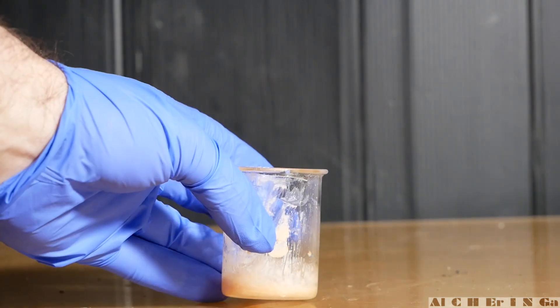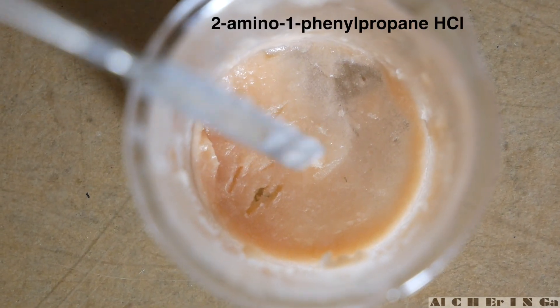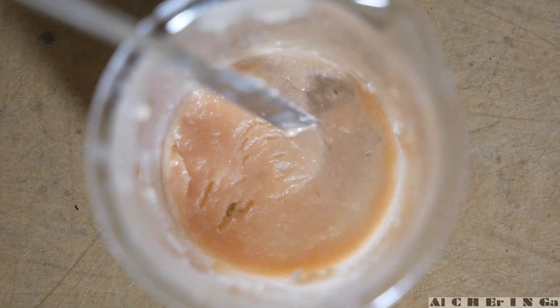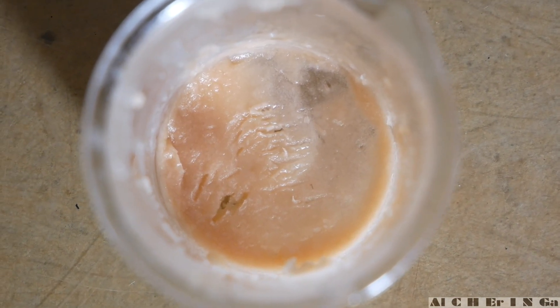As the mixture cools down, a pinkish white-colored crystals are observed. This should be moderately pure 2-amino-1-phenyl-propane hydrochloride. Note, a few more crystallizations are needed to achieve a pure white crystalline material.